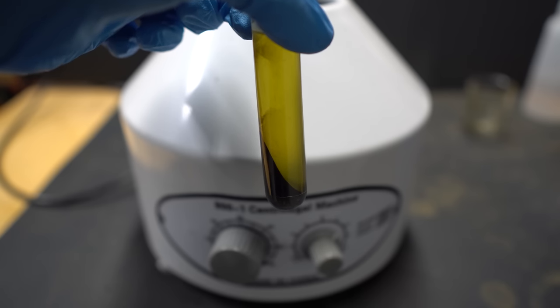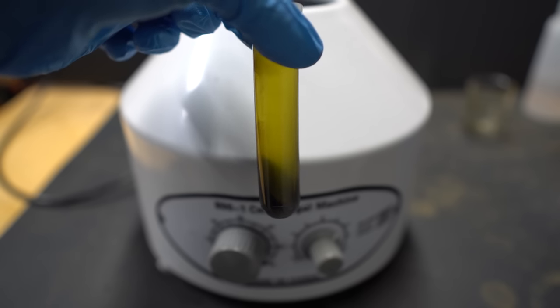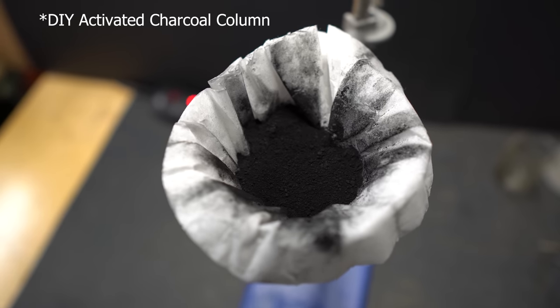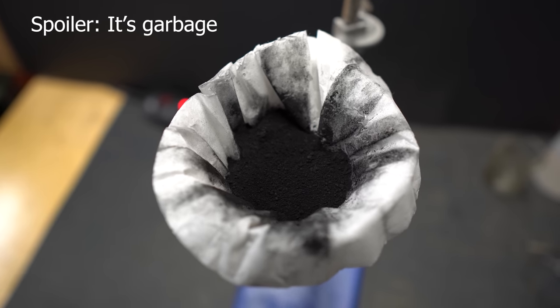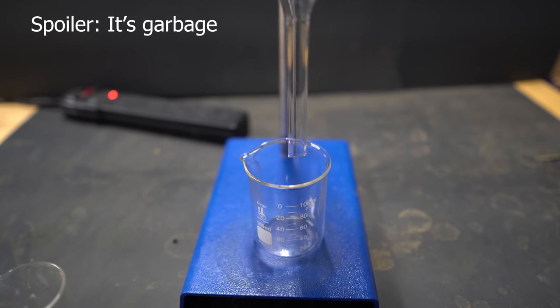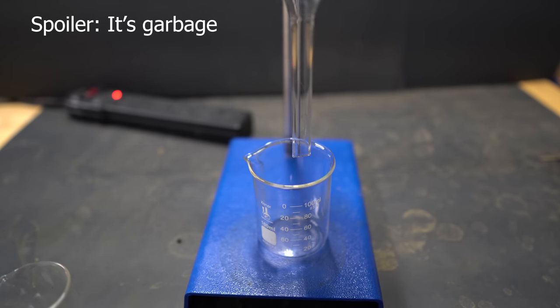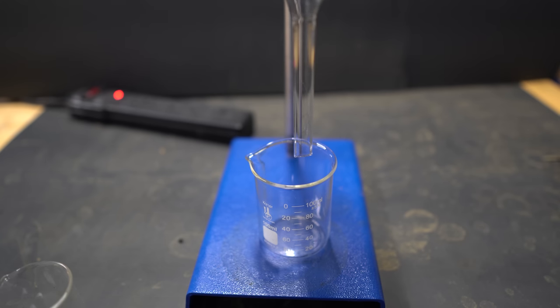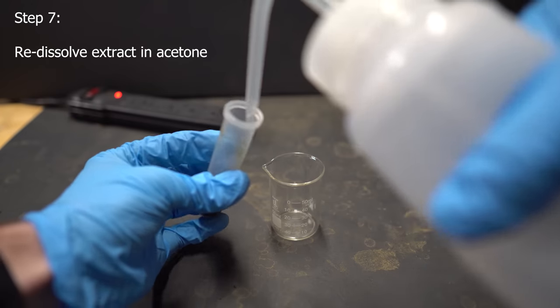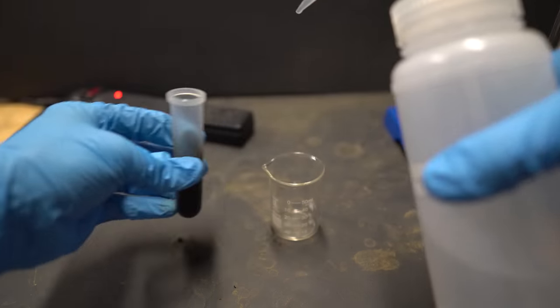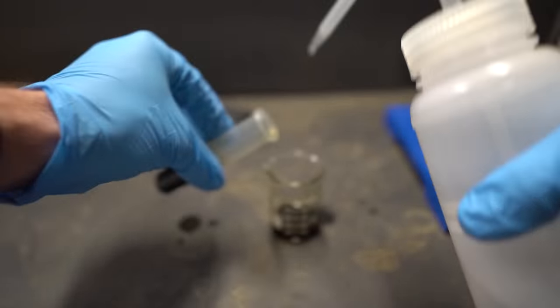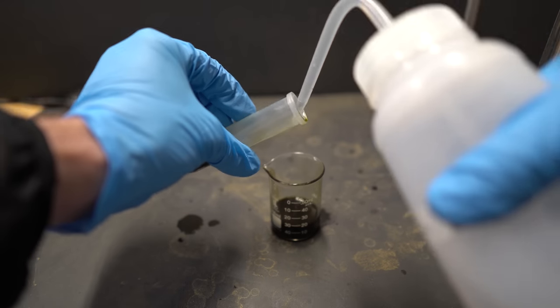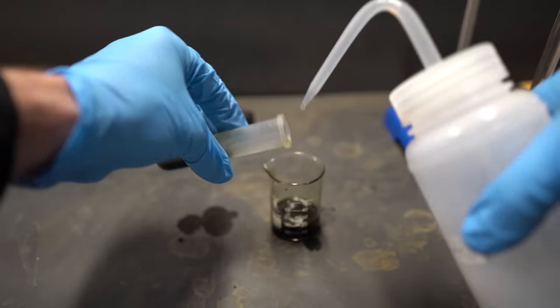The main difference in this procedure is I actually ran everything through a DIY activated carbon column. This was the best that I had and spoiler, it's pretty garbage. It's not garbage in the fact that it doesn't work, it definitely works, but I also had to do an additional step because it didn't filter correctly. We're going to need to redissolve everything in acetone and this is what we're going to run through the activated carbon.